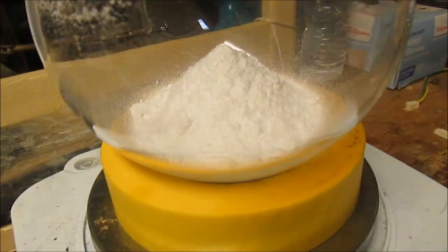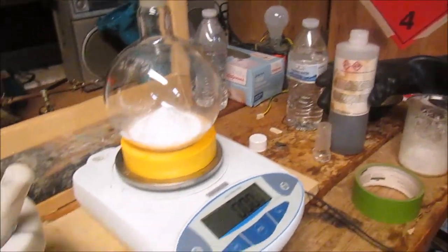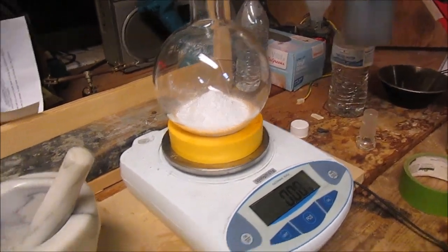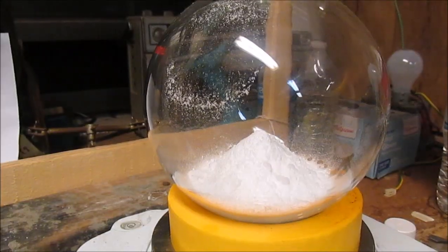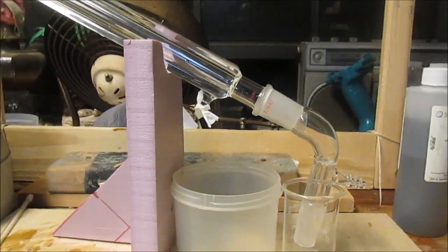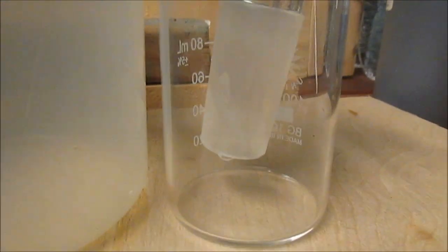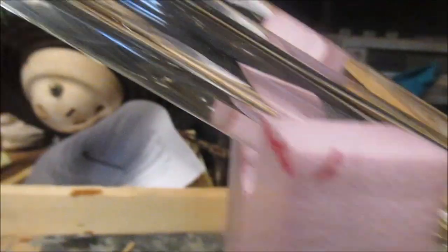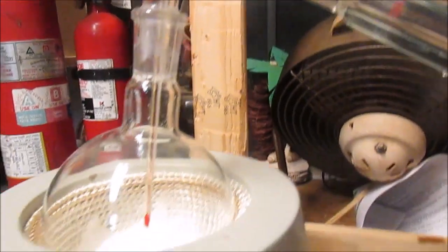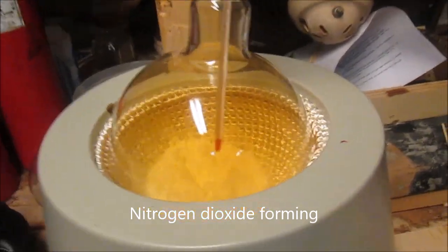Now we're going to put in 38.92 grams of sulfuric acid. I believe we have something like 64 grams of sodium nitrate. This is our setup — it's a little bit better than last time. We have an actual little foam stand we made so it doesn't fall. Rather than going straight into a pressure vessel, we're just having it go right into a beaker. The distiller's full. We have a place to put more water in. We've got a thermometer. Time to get this hot.